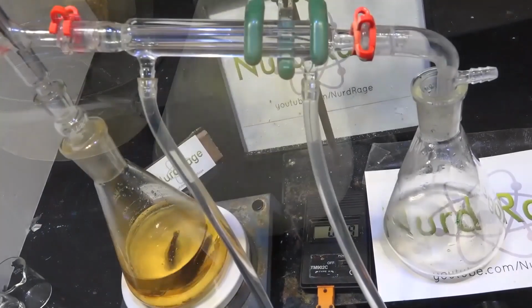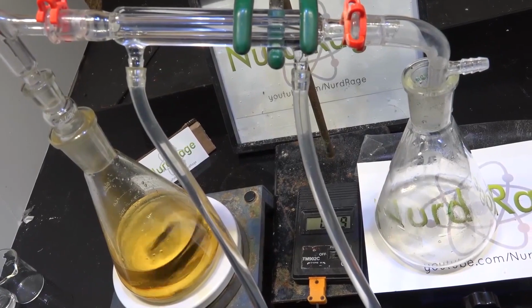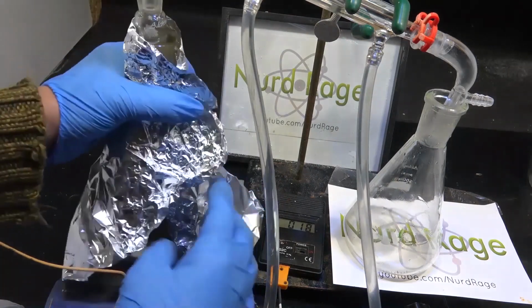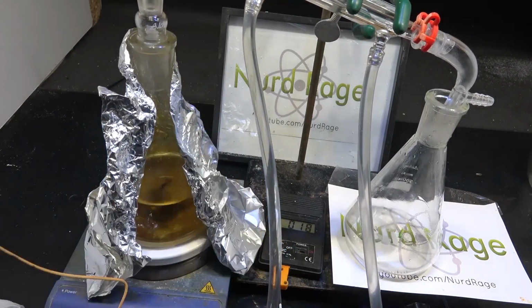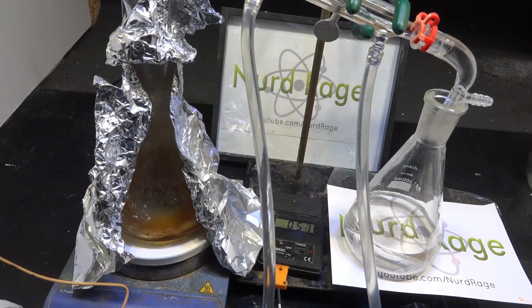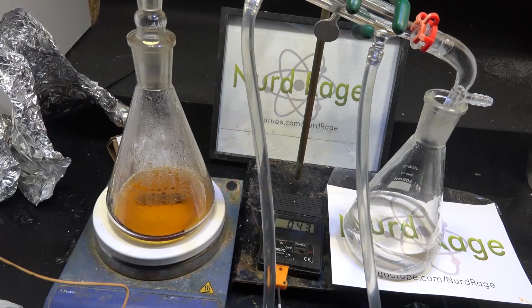Now back to our acetone filtrate. Set up a simple distillation apparatus and distill off the volatile acetone from our reaction mixture. Set the hot plate temperature to 130 Celsius. The p-chlorophenyl acetonitrile boils well above that, so we don't have to worry about it distilling over. While I can easily crank the temperature higher, I instead want to be as gentle as possible so we don't burn and decompose our product. Keep distilling until the temperature starts dropping, indicating everything that can boil at 130 degrees Celsius has boiled off.